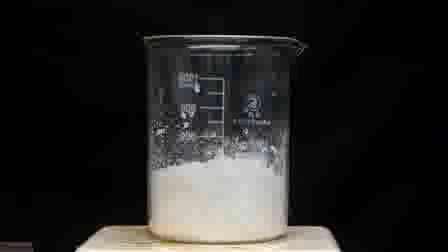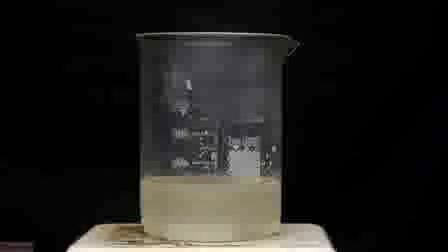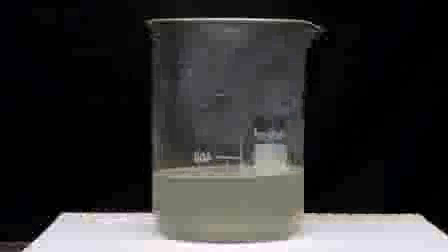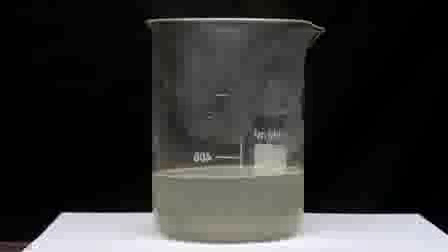In the meantime, I decide to recrystallize all of the ammonium chloride that I recovered. The total recovery was about 160 grams of damp ammonium chloride, and I recrystallized it just using water. Eventually enough water was added so that all the ammonium chloride dissolved, and we're left with a slightly cloudy solution. I'm not sure what the cloudiness is caused by, but I think maybe if you filtered it you can get rid of it, but I couldn't really be bothered.